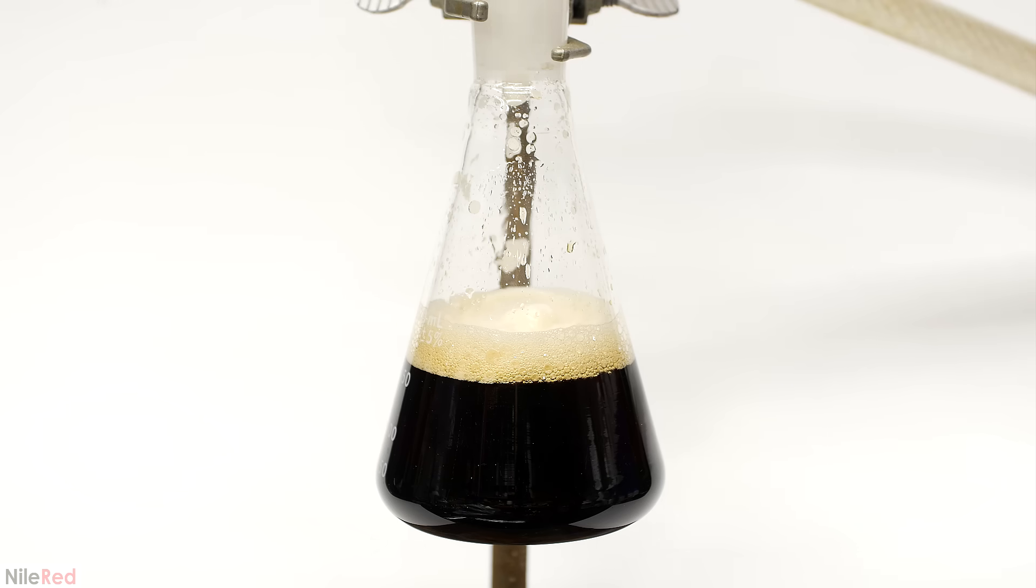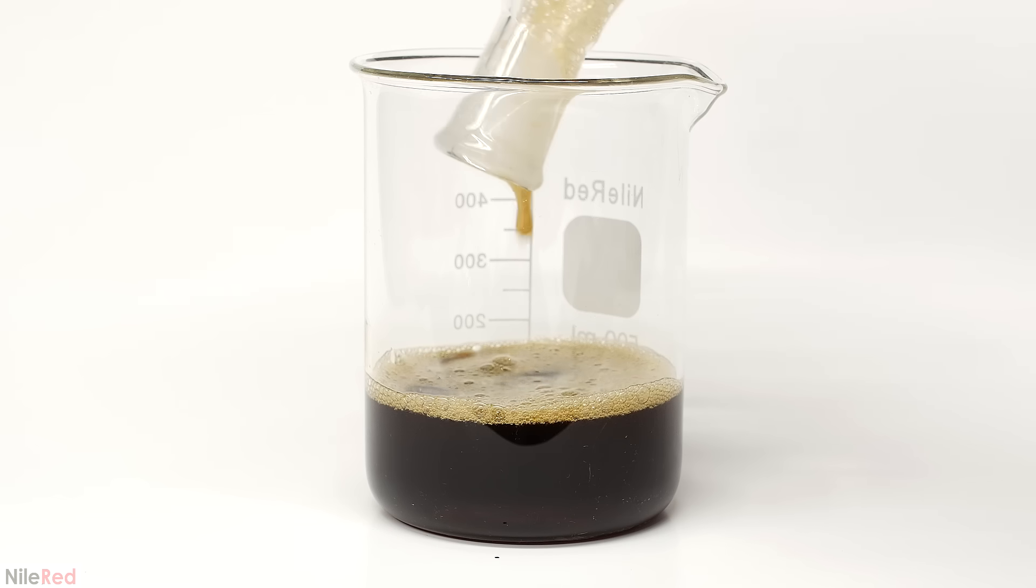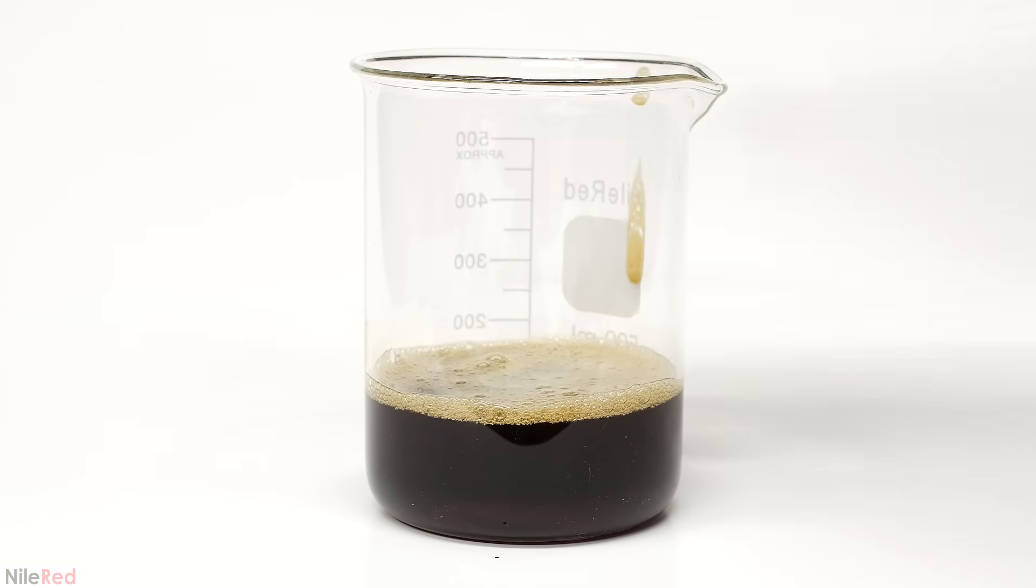In the flask below, I have all the liquid that passed through the filter, which is extremely dark and nearly black. This extremely concentrated pee contains all the urea, and to get it out, I'm gonna have to chemically process it.